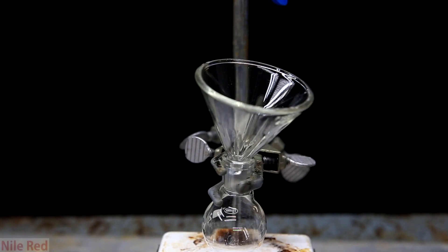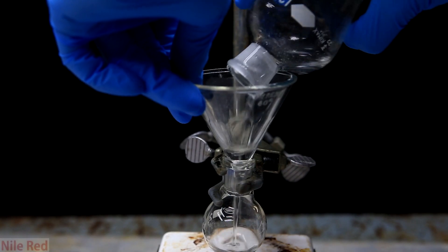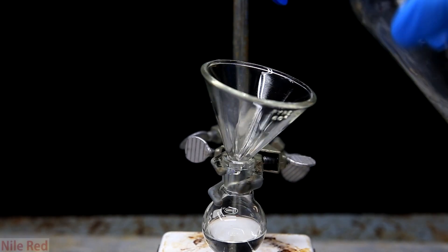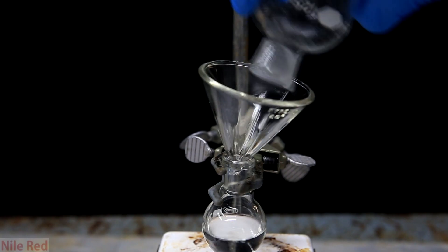The now relatively dry ether is poured out of the top of the separatory funnel into a clean round bottom flask. We don't drain it out the bottom because it would pick up some of the water that's left in the stem.